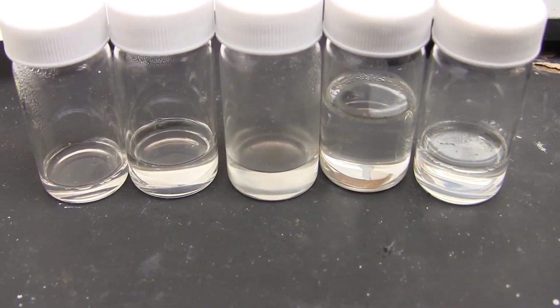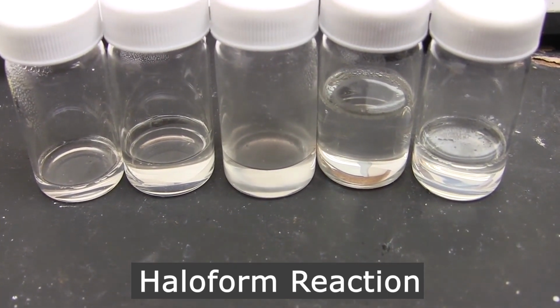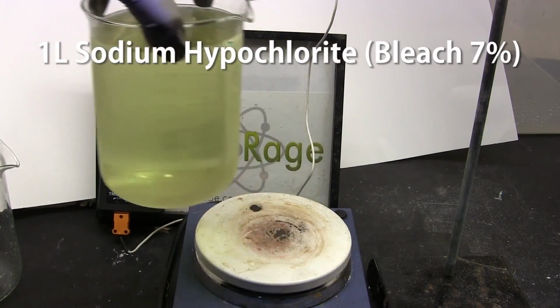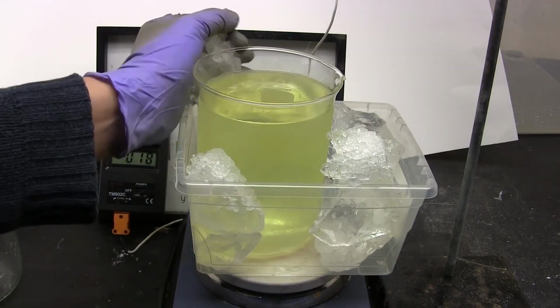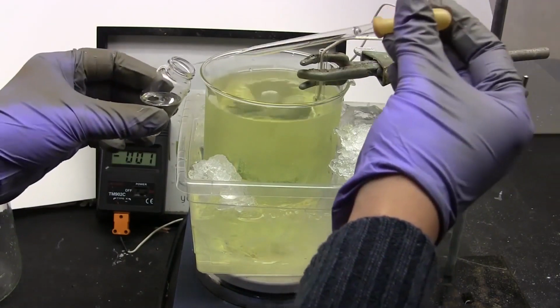I need some chloroform and propionic acid, and a convenient way to make both is the haloform reaction. So let's get started. Get about a liter of sodium hypochlorite bleach that's been previously cooled in a freezer. Now this reaction is also quite exothermic, so it helps to build an ice bath around your bleach as well. Now I'm lowering in a thermometer to monitor the reaction. Now we start adding the ketone.